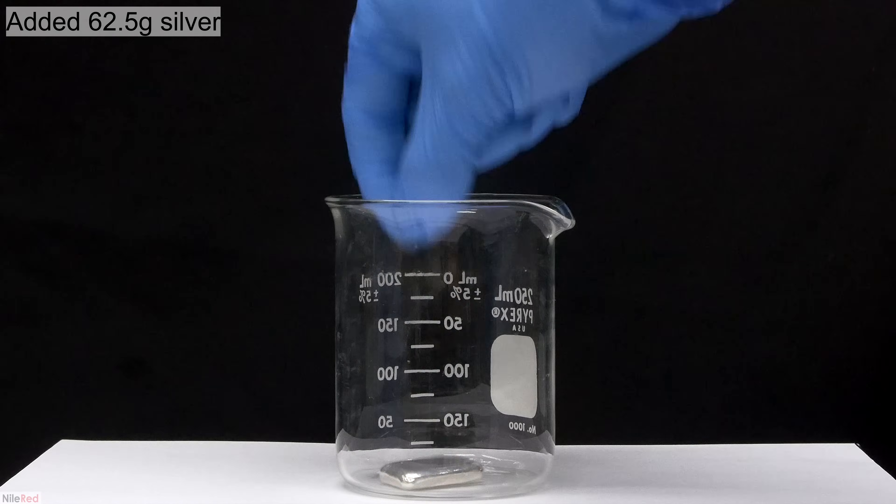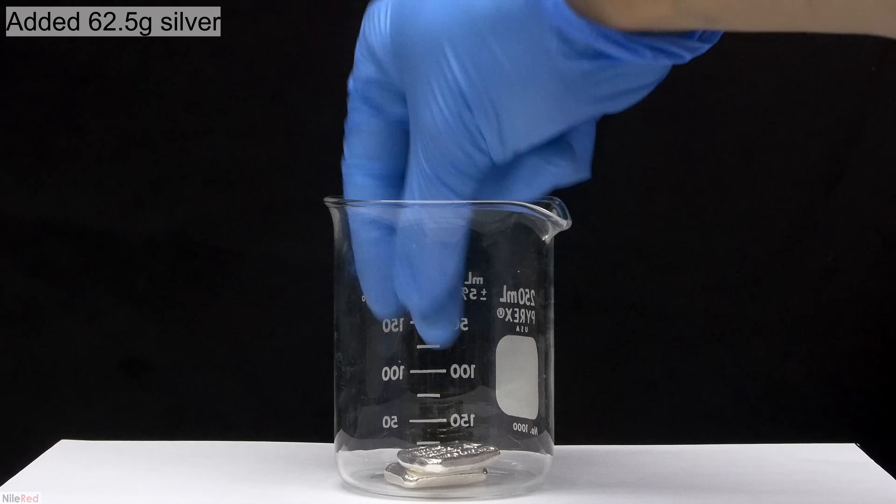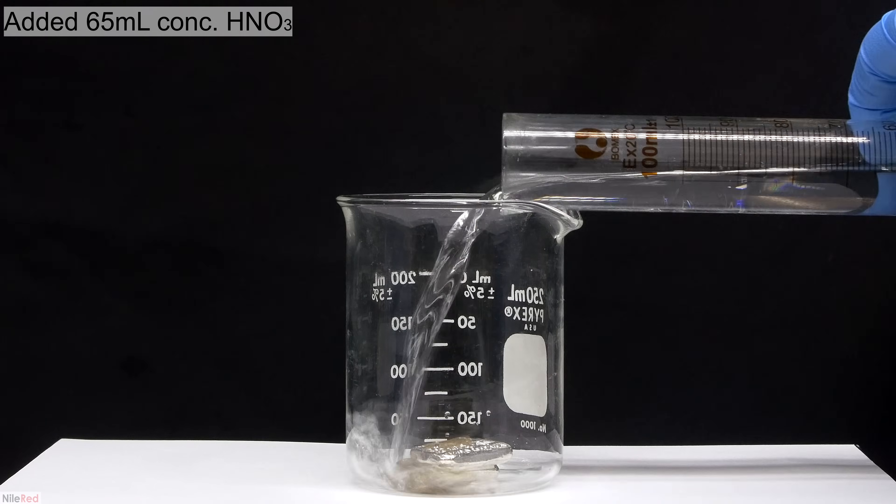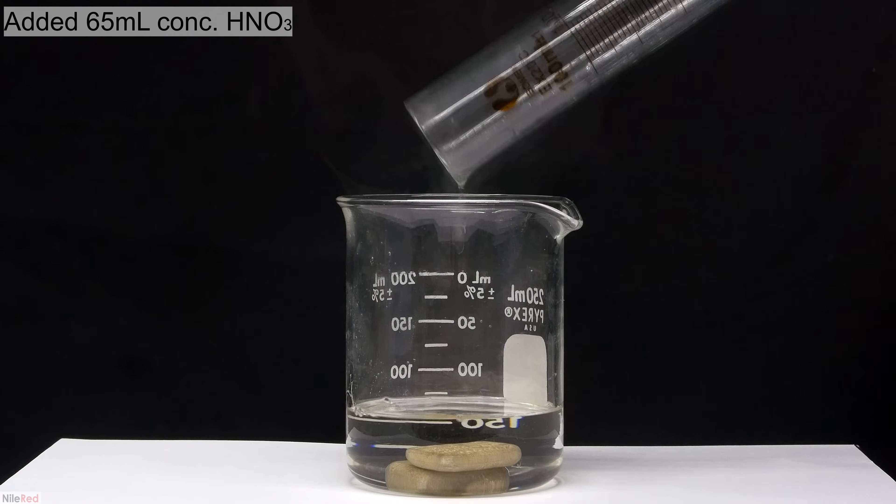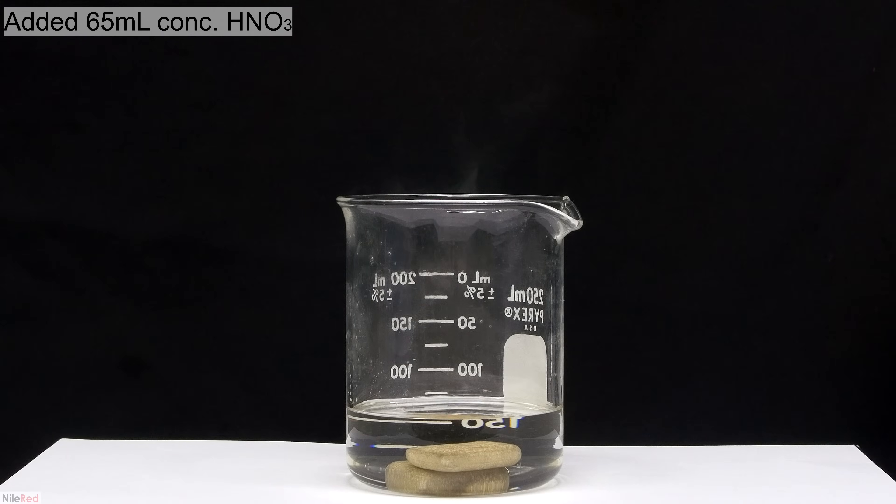To start things off, I put the two pieces of silver into a beaker. Onto the silver, I then added about 65 milliliters of concentrated nitric acid.